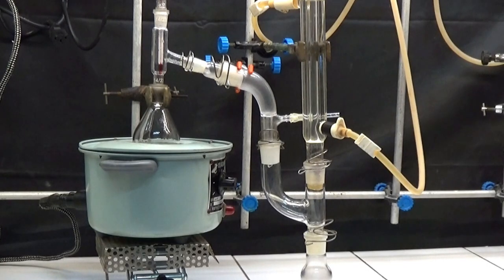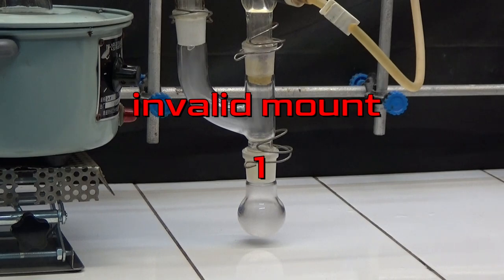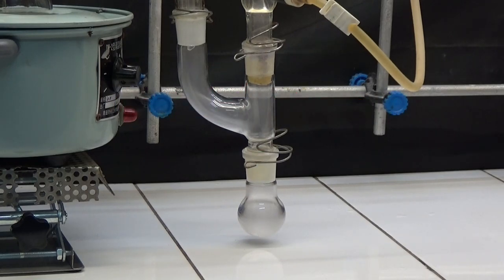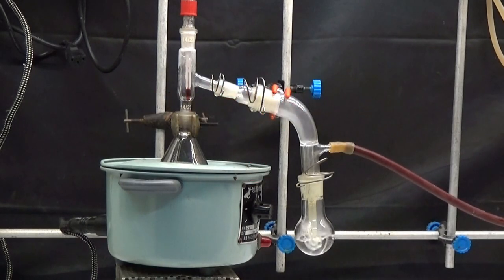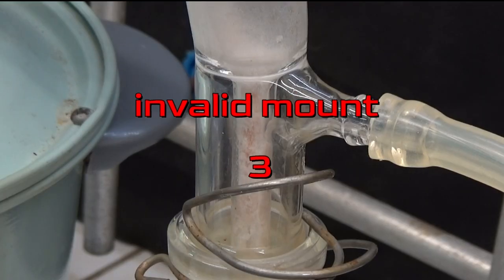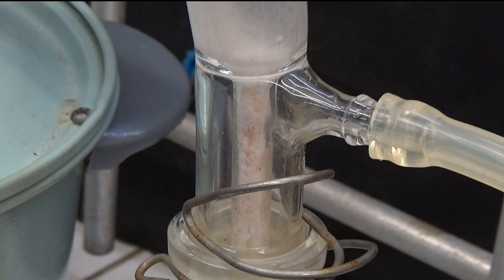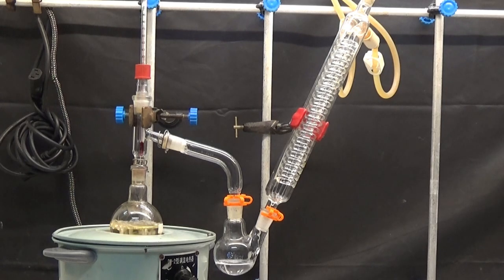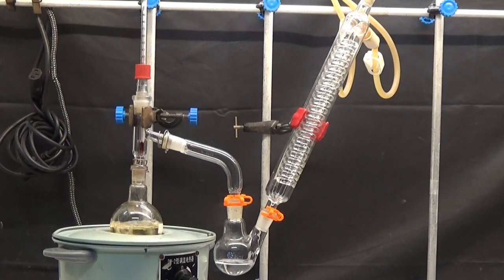With vacuum distillation, I observed that the phenylacetic acid vapor goes directly to the vacuum tube. After several invalid assemblages for that distillation, I opted to pass the vapors through cold ethanol. The first assembly had a problem, that the acid vapors condense into the narrow parts and plugged the system, with the danger of overpressure. The solution was not to put very tight tubes to allow the vapors of phenylacetic acid to pass through.